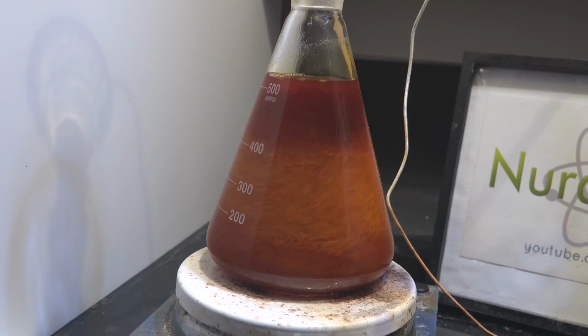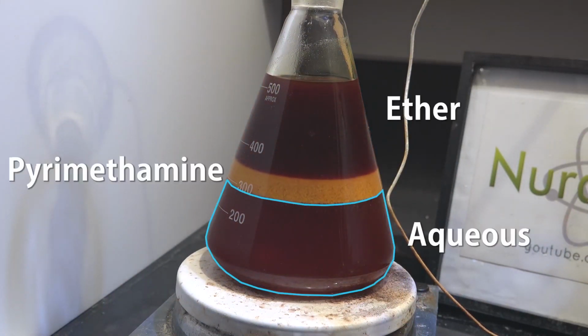Turn off the stirring and let it settle. And there we go, this is much better. We have a clean aqueous layer that dissolves all the salts and other polar side products and contaminants. And in the upper ether layer is where all the non-polar impurities collect. In the middle is a layer of pyrimethamine. It has only minor solubility in both, so it separates into its own layer.